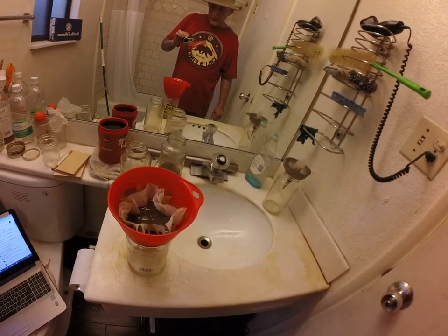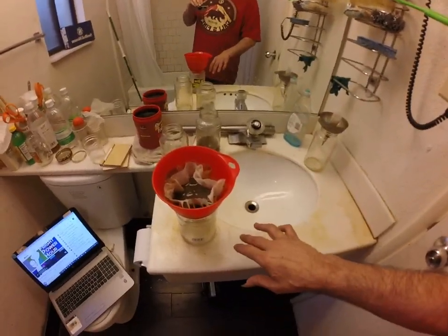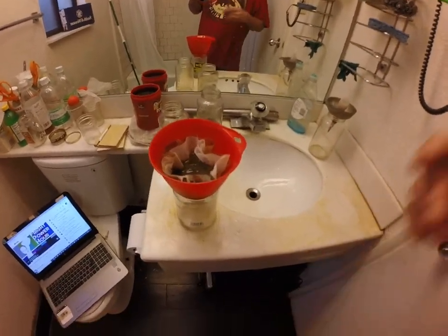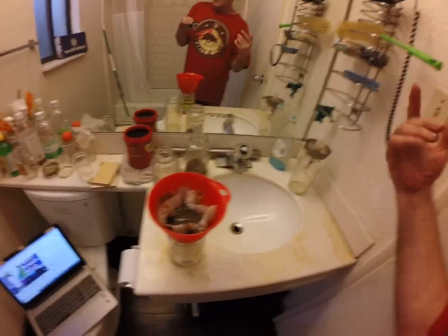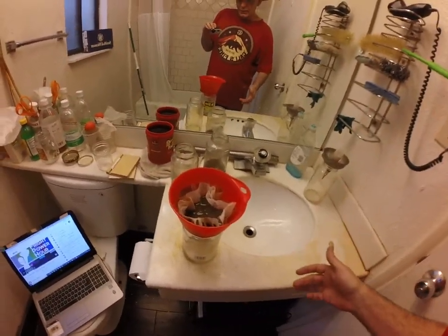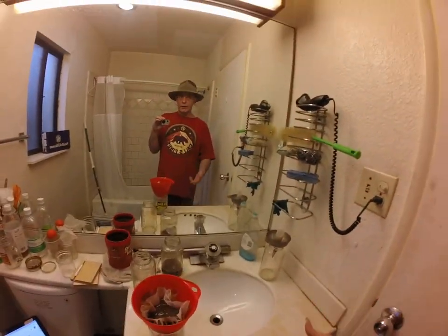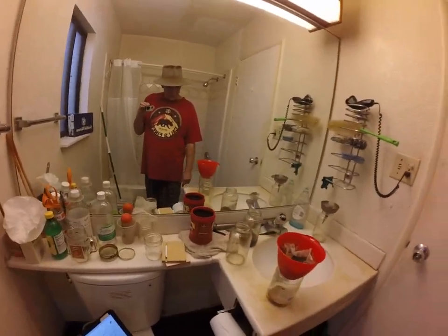That's kind of the way it is. The liquid will drop out of this leaving the Free Base behind. Then I'm going to put the Free Base back into clean water, stir it around, let it settle out, and do this whole thing over again and again and again. It takes forever, but it's worth it.